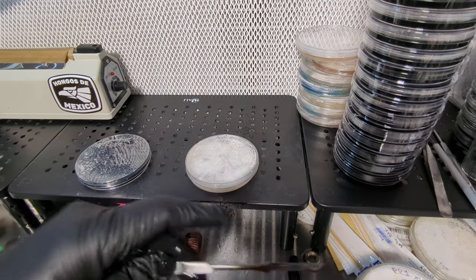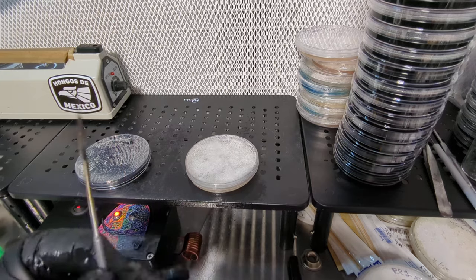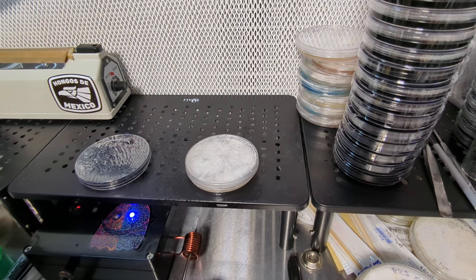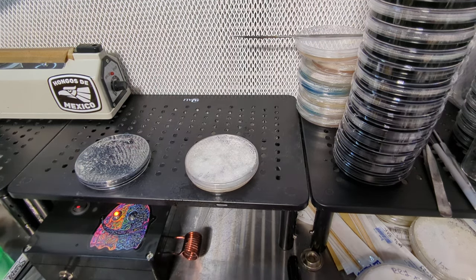What I'm going to do now is sterilize my scalpel and get ready to take some backups. I'll sanitize it with alcohol first to clean up anything on the handle or anywhere that's hard to get to. I'm still going to sterilize it after. I go all the way in pretty deep into the junction to get the whole connector hot, so anything caught in that juncture gets cooked. I'll back out, finish sterilizing the blade - a good red hot all the way along the length of it - then put it up there to cool.